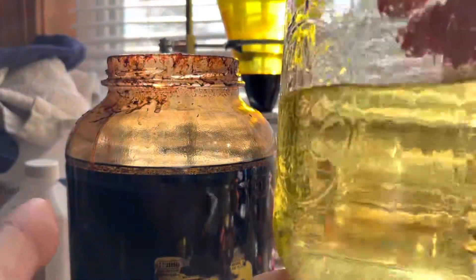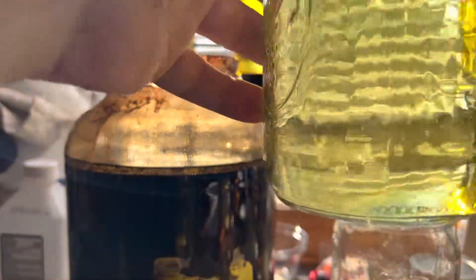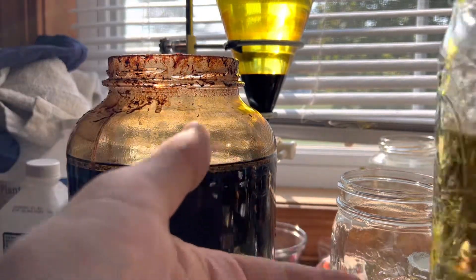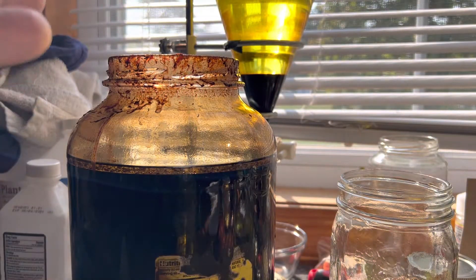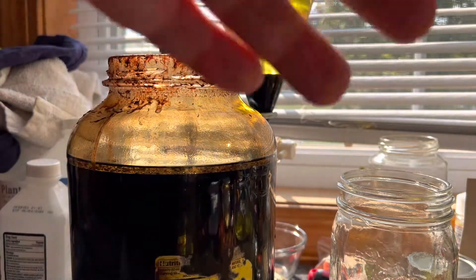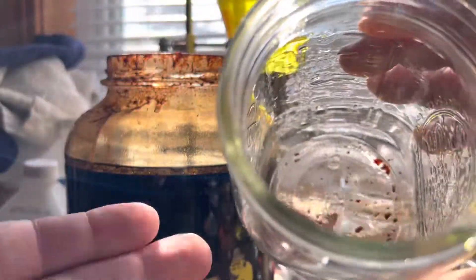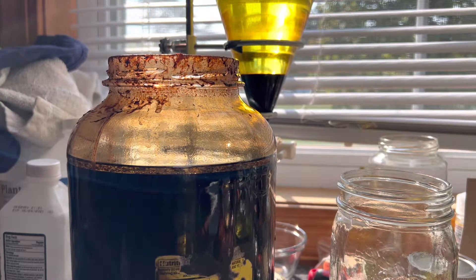Another way is to pour this out into a glass baking tray, because that's the next step. Sometimes you'll see the same little black specks pour out with it. If you've poured the solvent into a baking tray and you have the same black specks in the bottom, don't panic. Pour it back into another jar, back into another tray — whatever you can do. You'll notice the same effect in the bottom of the tray where the specks stay there, and if you just transfer it to another container you can essentially continue to filter out what settles to the bottom.